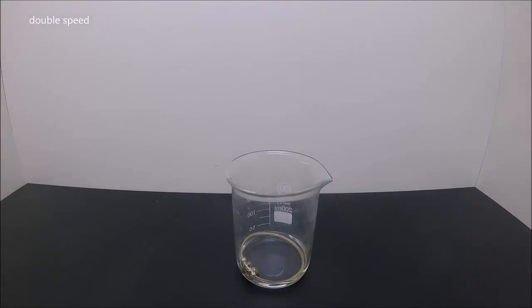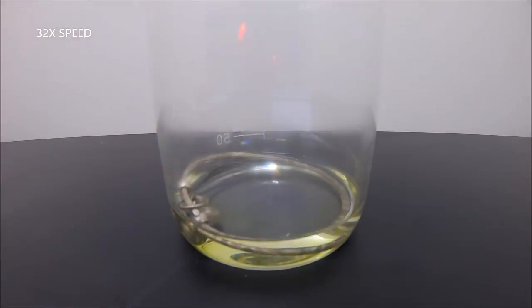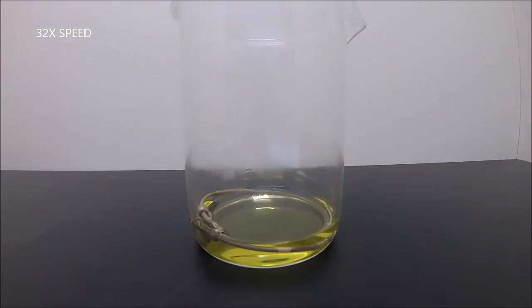The silver immediately took on a dark color, but other than that, not much is happening. Let's take a closer look. As time progresses, the solution gradually took on a yellow color, but the reaction is still rather slow.